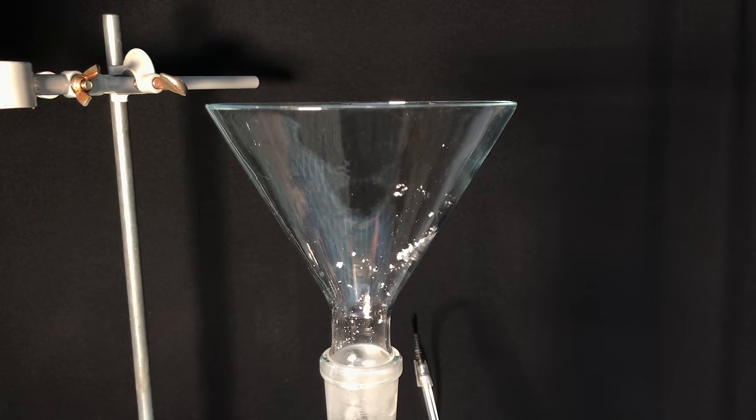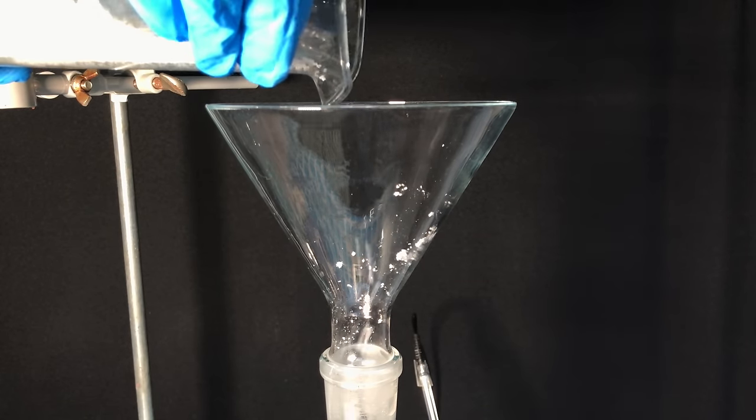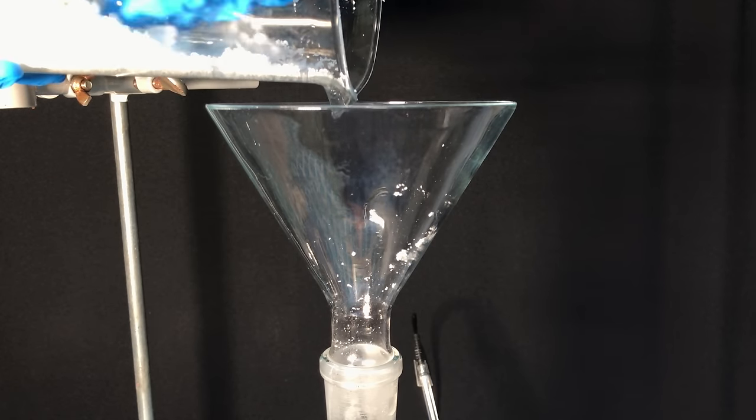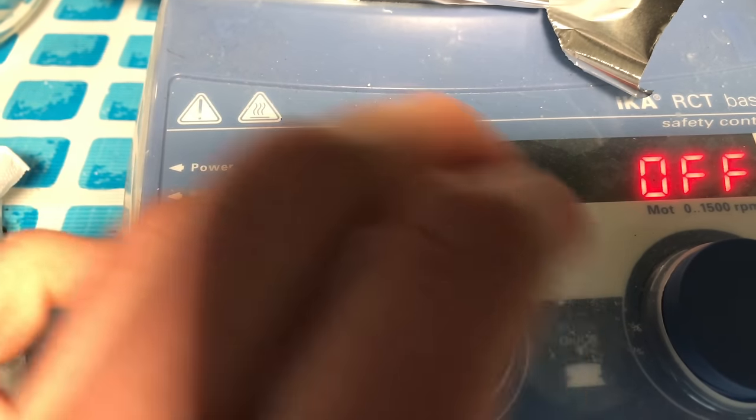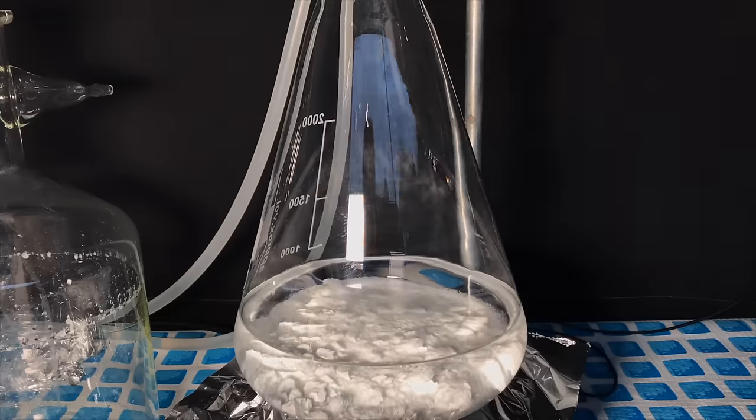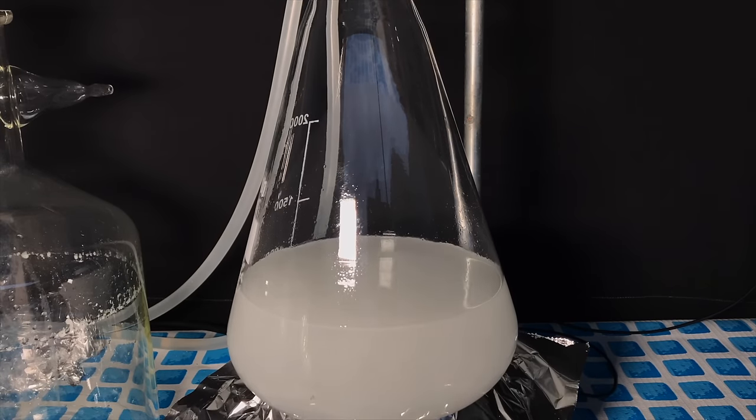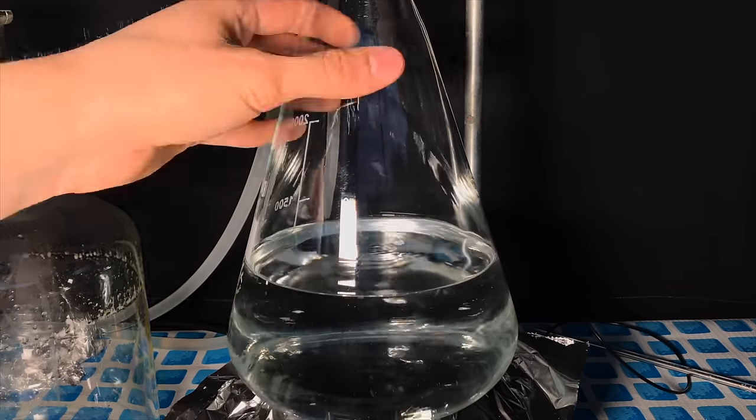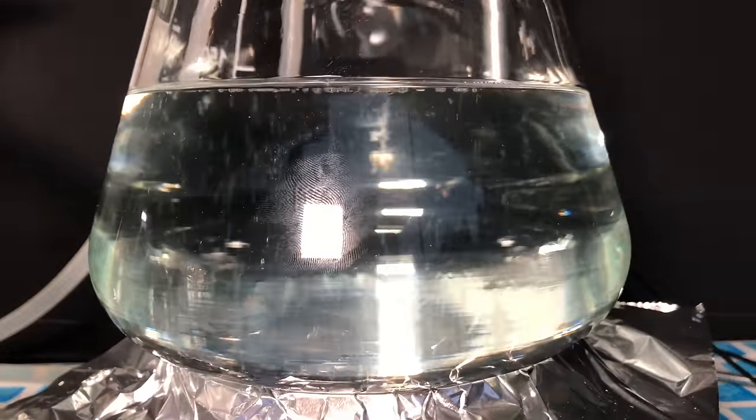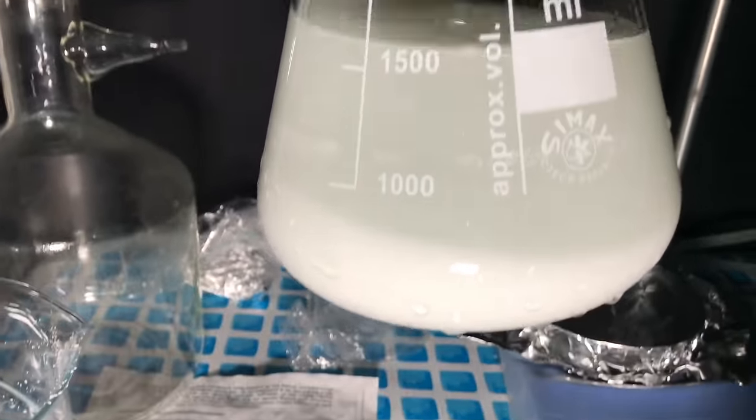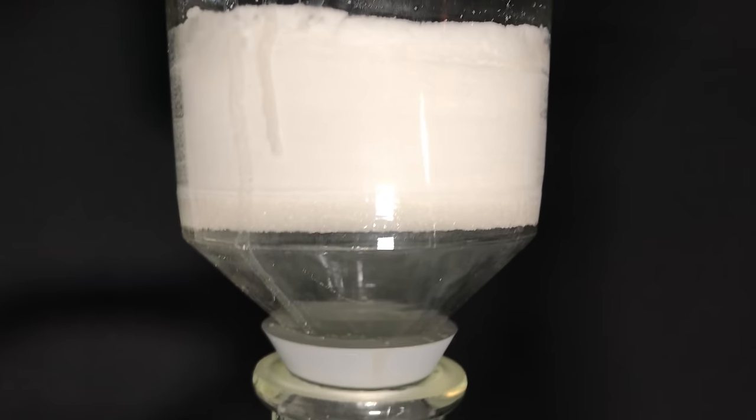To do a recrystallization, all of the powder was added to an Erlenmeyer flask. I added some methanol, set up a reflux and cranked up the hot plate. Once it boiled, more and more methanol was added and in total I added about 800 ml. At some point we were left with a clear solution, so I took it off the hot plate and allowed it to cool down in the fridge. A lot of white stuff crystallized out, we did a filtration and I sucked the vacuum for about 5 minutes.